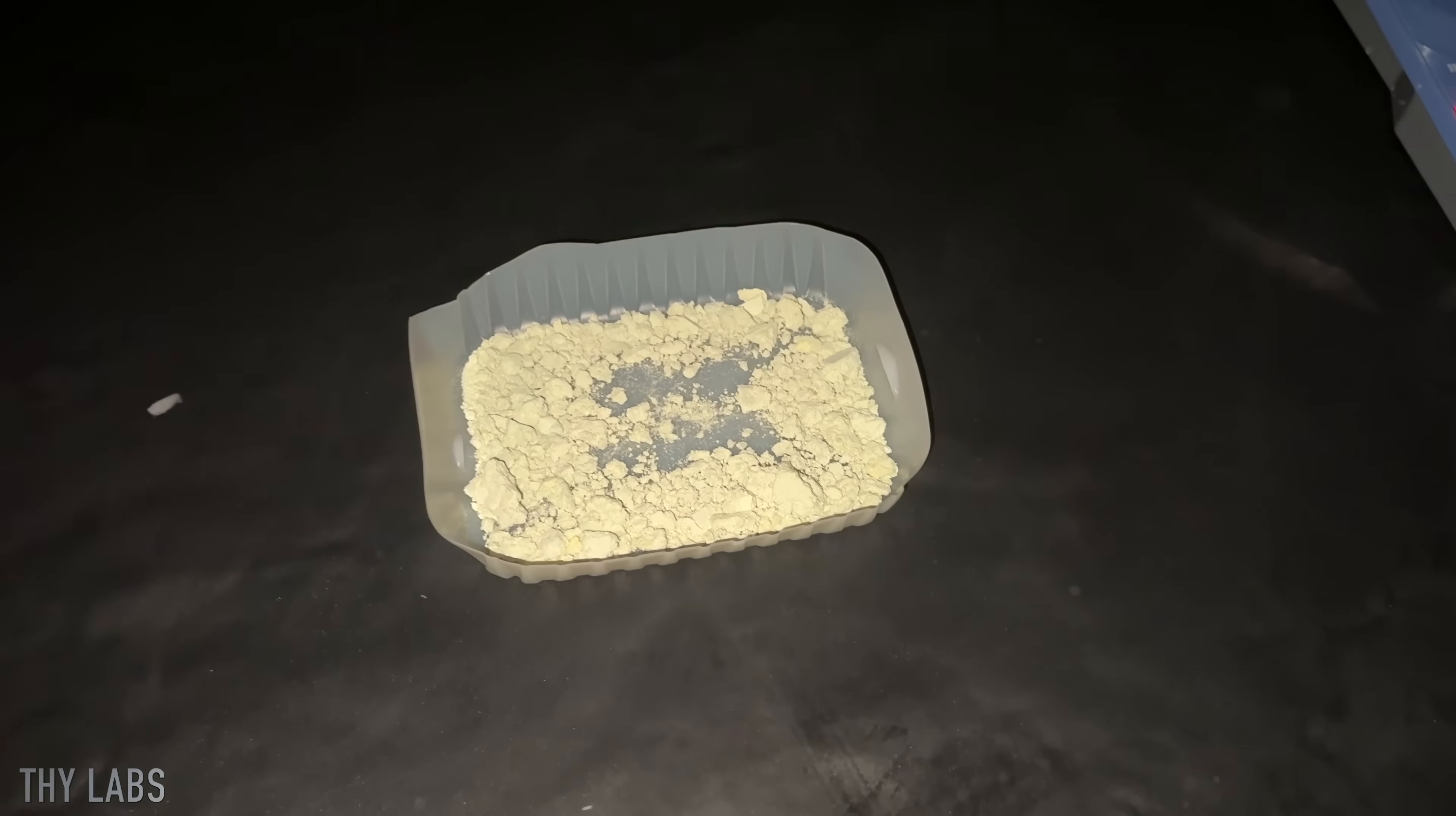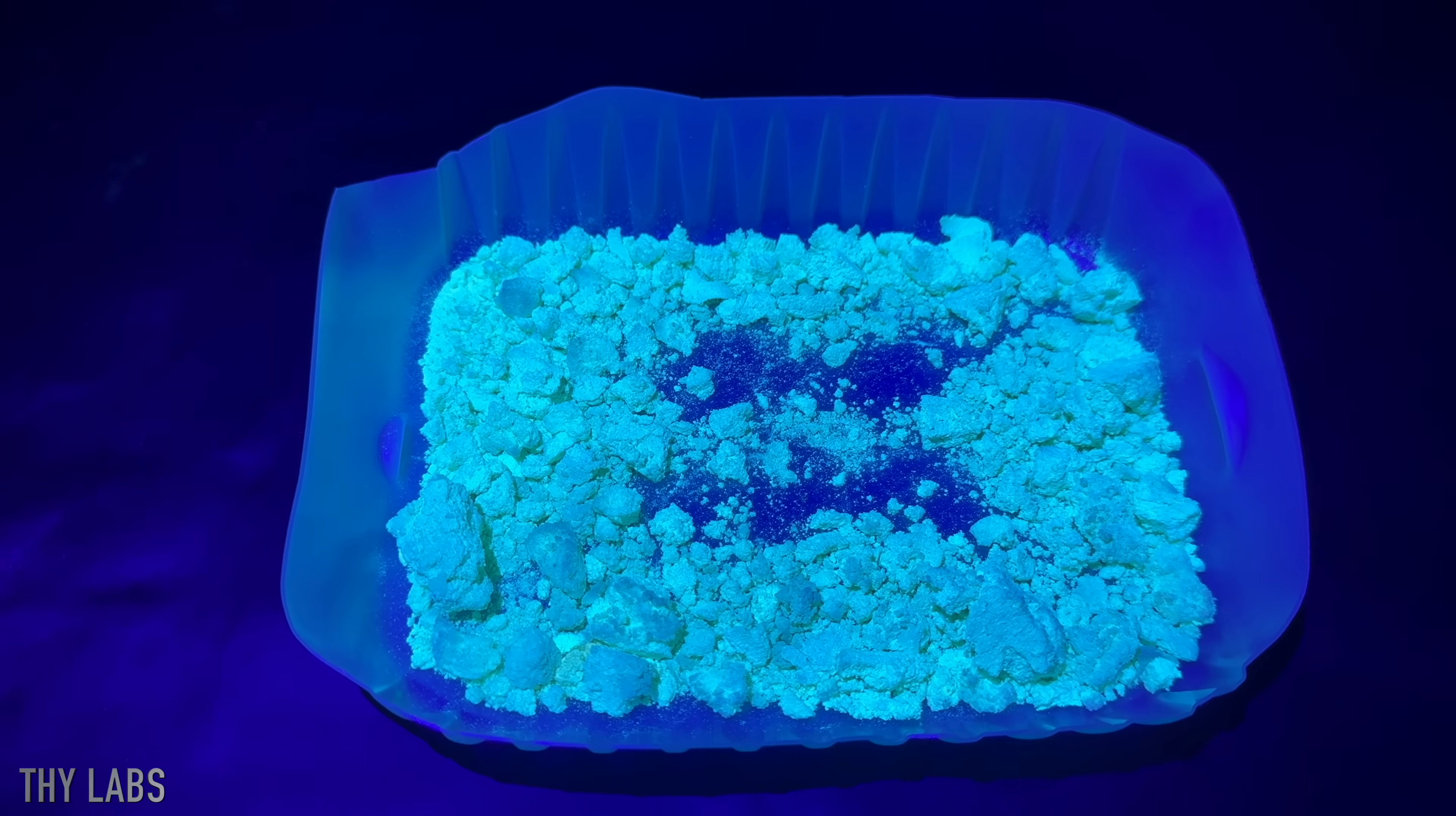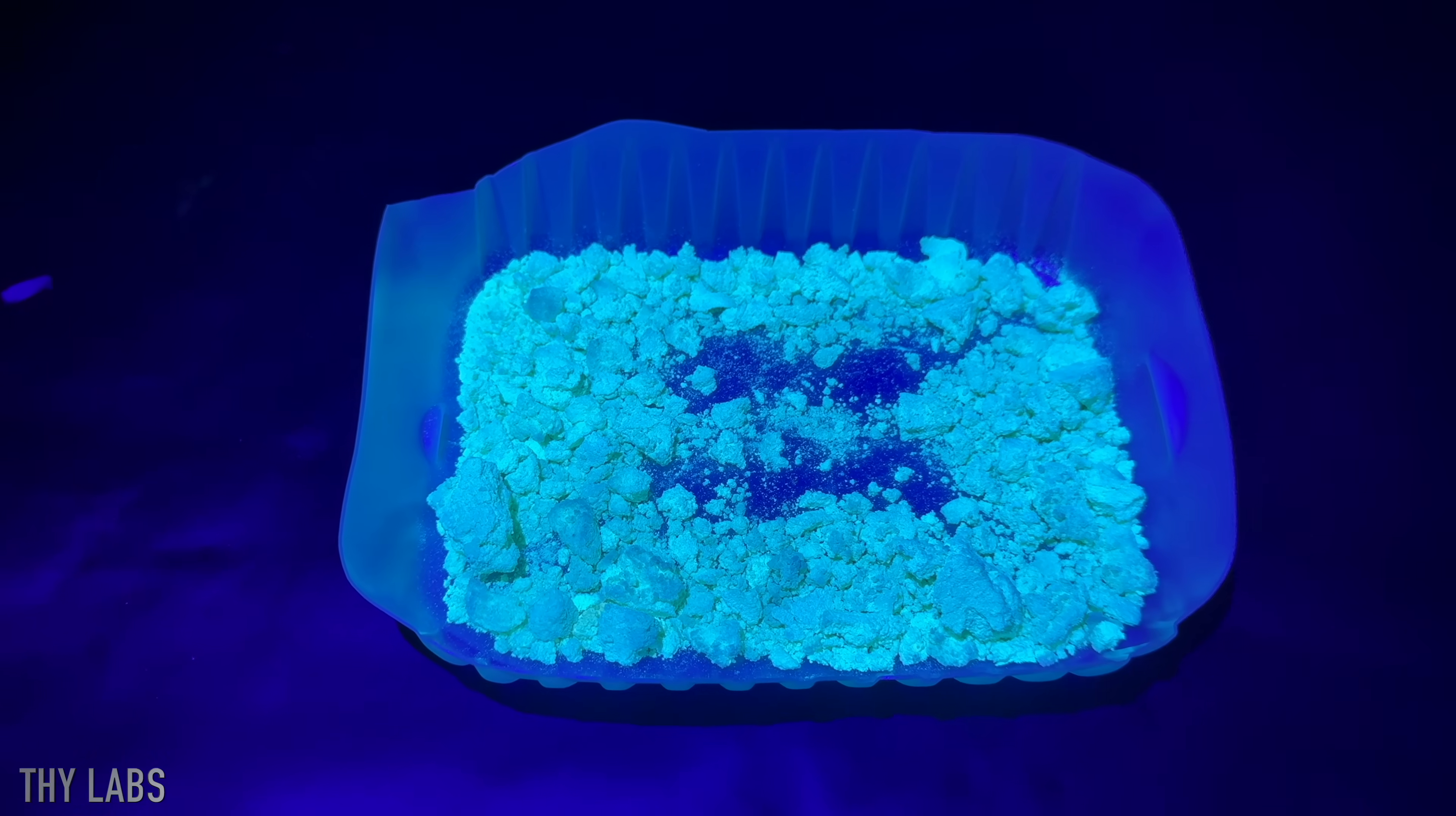Once dry, it looked like this. Out of curiosity, I used the black light on it, and even though I didn't expect it to be fluorescent at all, it had a beautiful blue fluorescence.